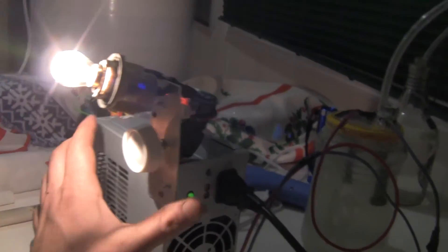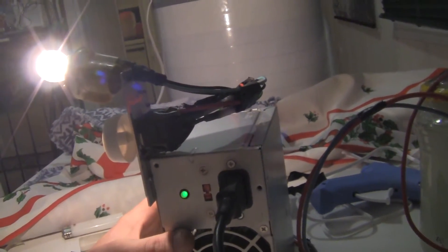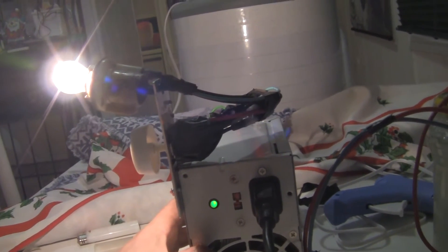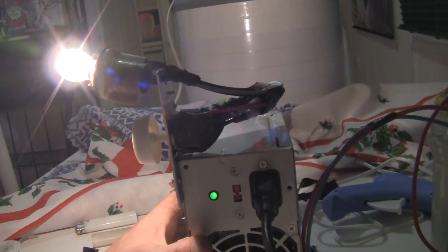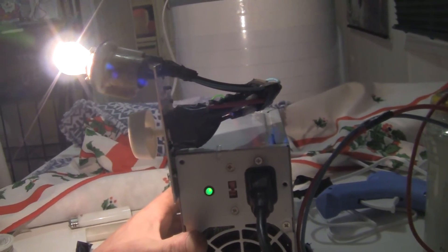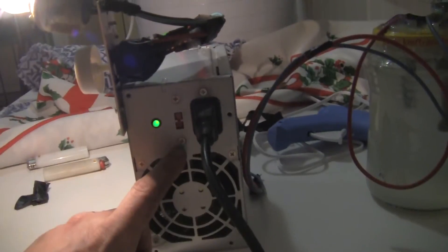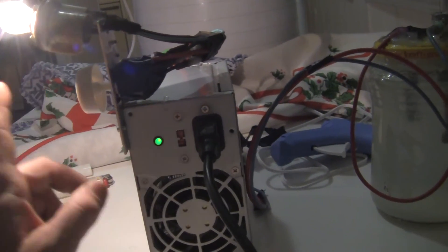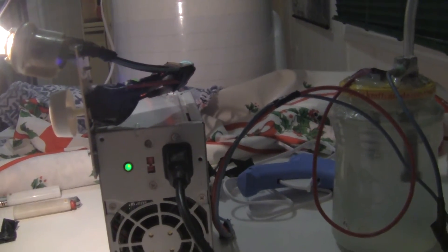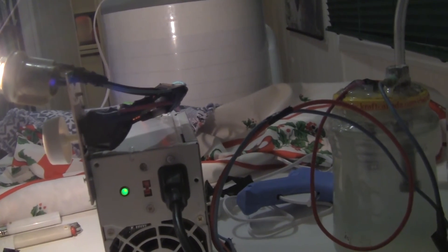The thing is it's a 120 volt AC power. With these modifications, there's a transistor and stuff in there that had to be eliminated, and some modifications. There's a coil, kind of one of the resistor coils in there too as well, it had to be eliminated. And basically it's just hooked through power supply into the resistor over to the cell itself. It's a little tricky figuring it out, but with basic electrical knowledge I managed to figure it out.